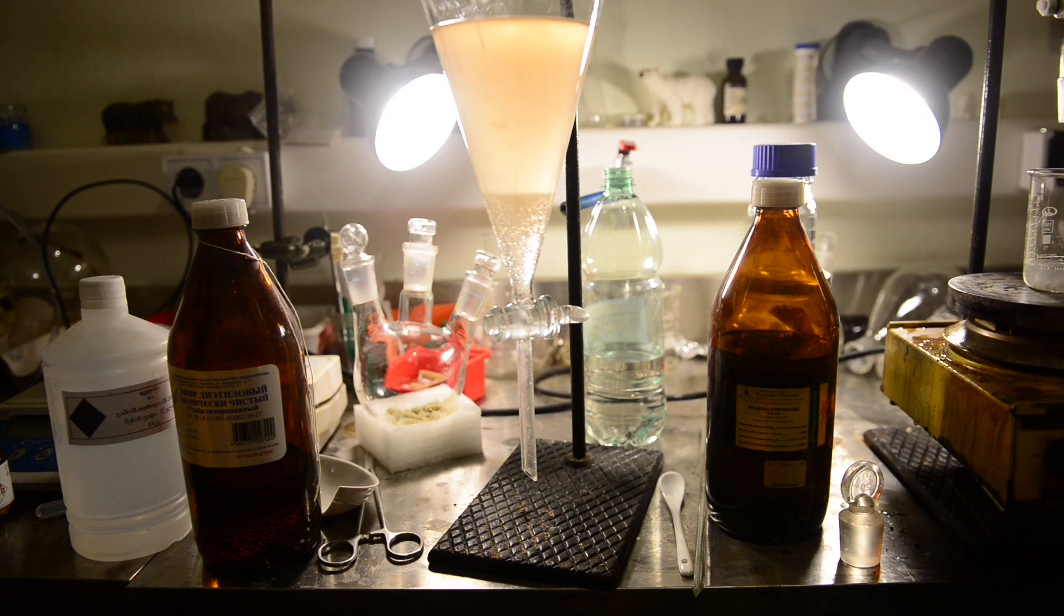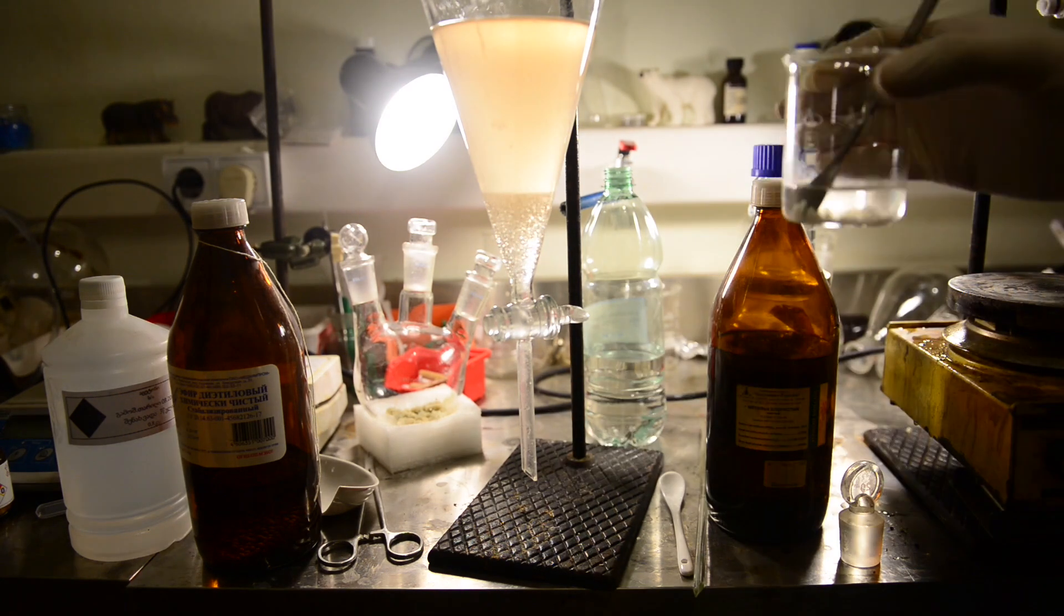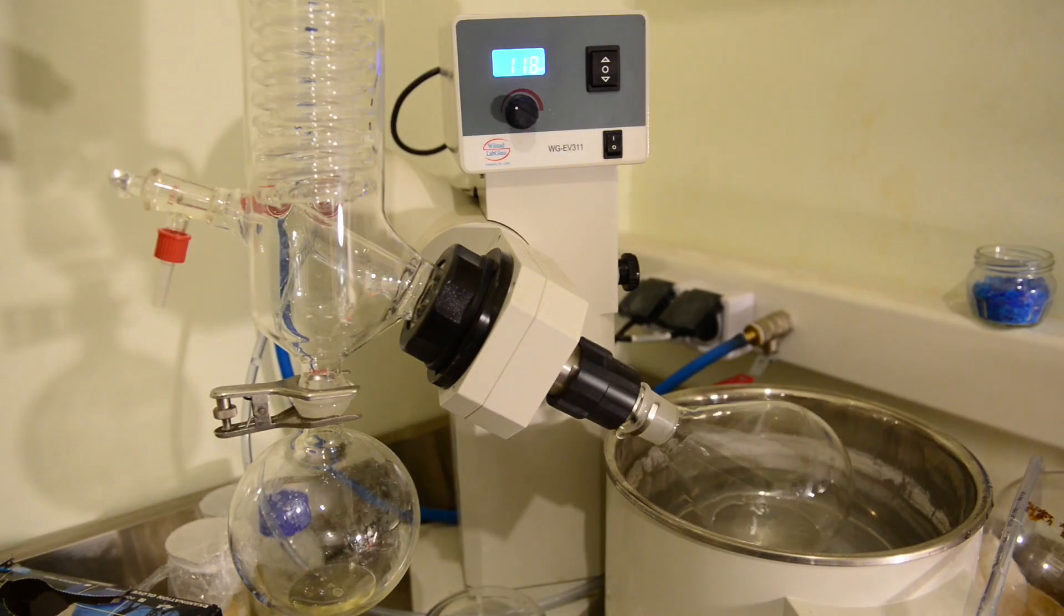Now we need to evaporate. We are charging our evaporation flask once again and connecting vacuum to the rotary evaporator. After evaporation yellowish transparent liquid is obtained.